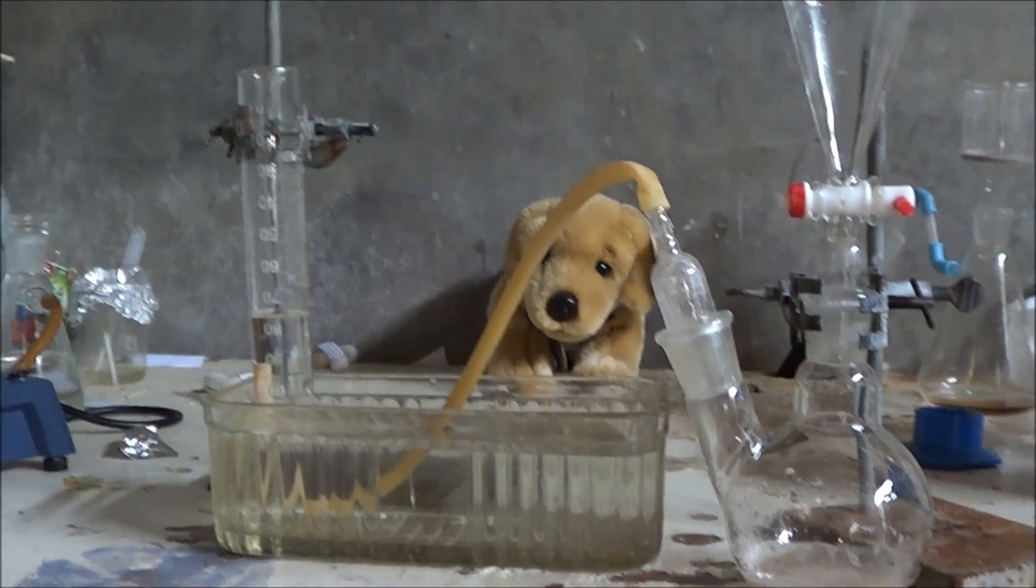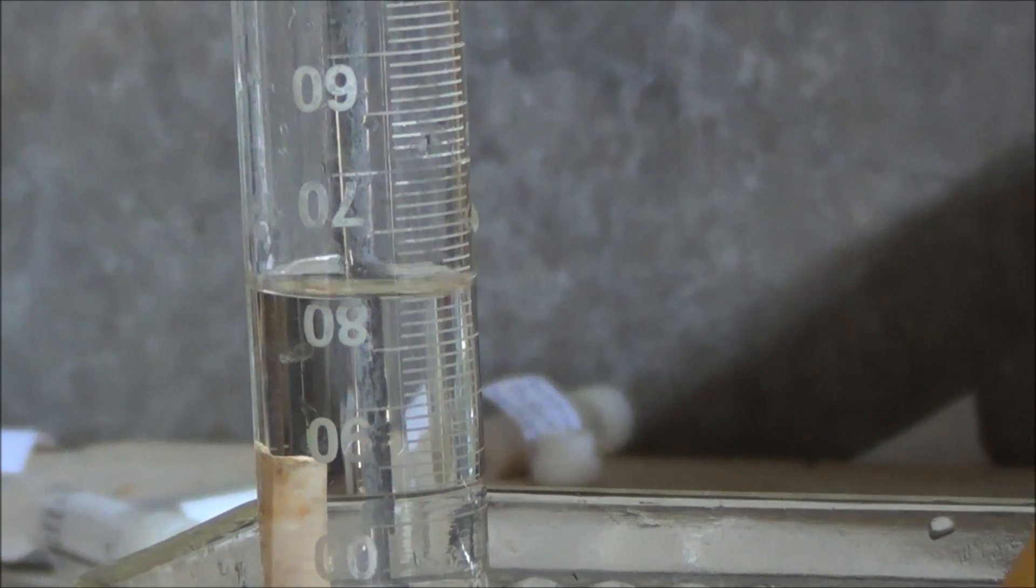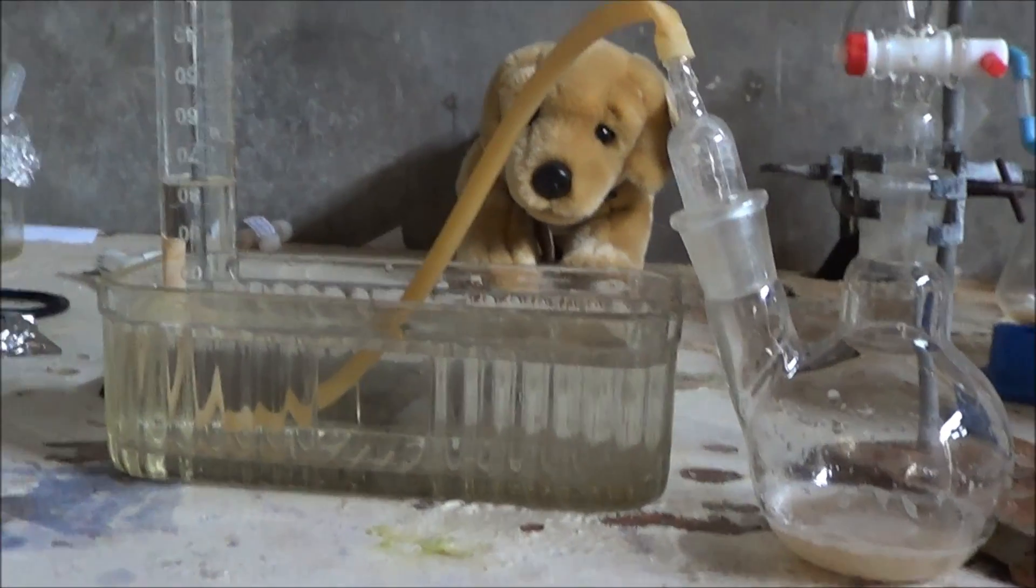Okay, it's about bubbling now. We see that we're at, whoa, what is that at? Yeah, that's just ticked over 80. I'll let it bubble a bit more, but it's just ticked over 80, so that's quite a bit of gas.